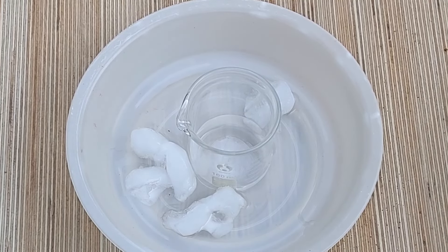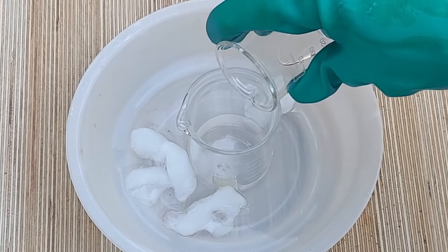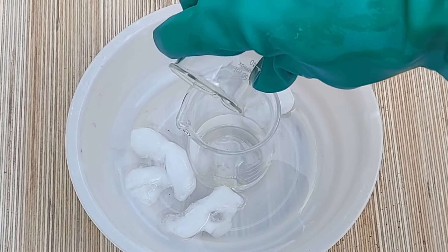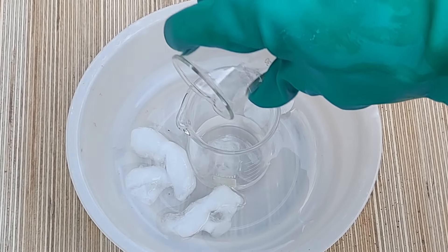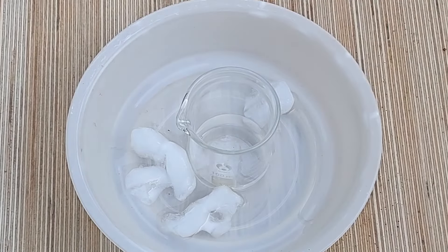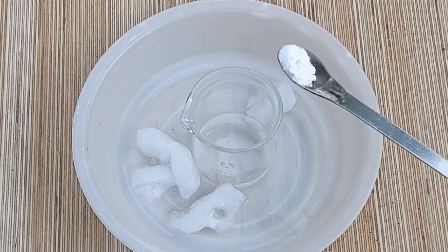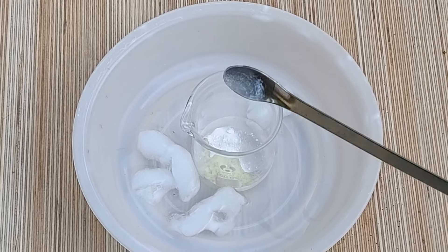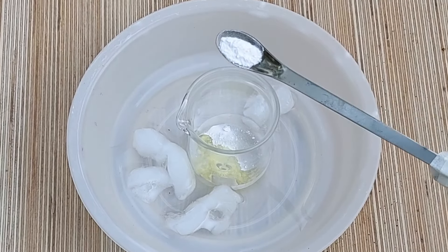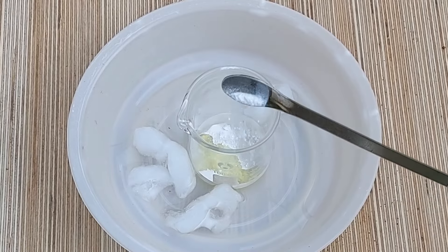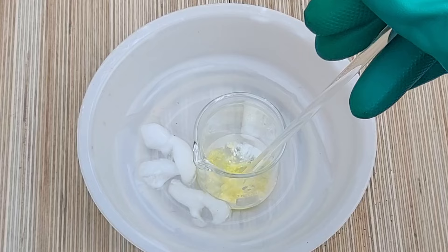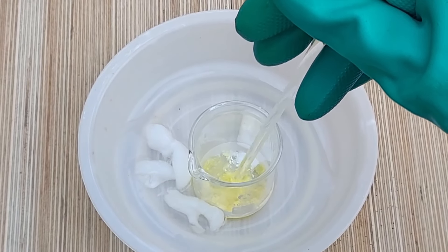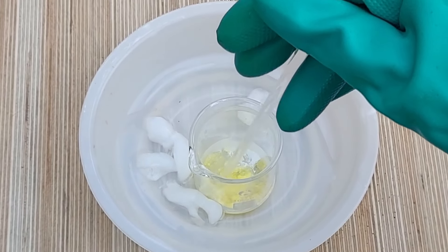I placed around that 100 milliliter beaker some sodium bicarb solution and added ice cubes because this is highly exothermic. I'm going to first put in the 1.6 milliliters of sulfuric acid. Which is not much at all, but this is all just testing how this will go. I'm now going to add the first amount of potassium chlorate, and the second amount. From here on I'm going to be wearing a face mask. To get the best reaction I'm going to mix these up a little bit more.